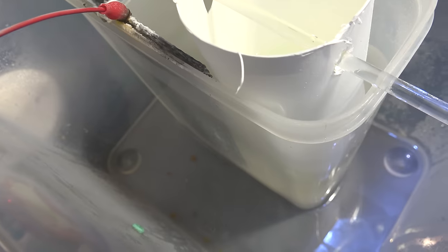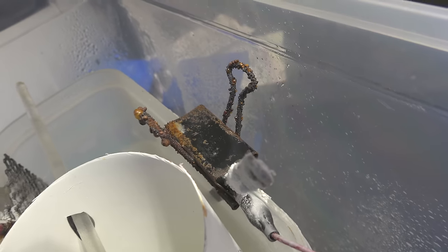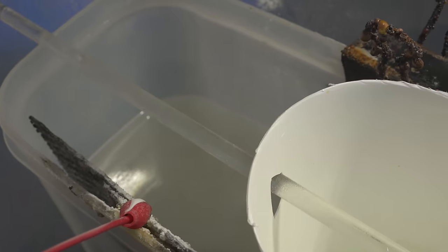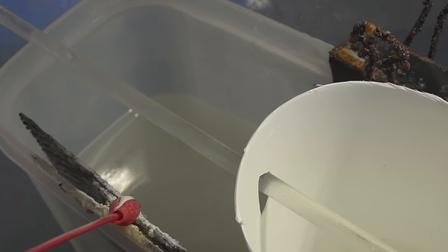There is some spray out and condensation in the bottom but that's minor. There is also some salt creep and corrosion around the electrodes but that's to be expected. Electrolysis is still proceeding vigorously. OK, let me turn that off and get the electrodes out.